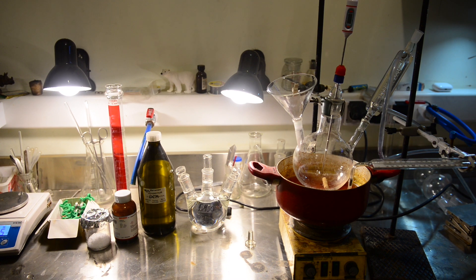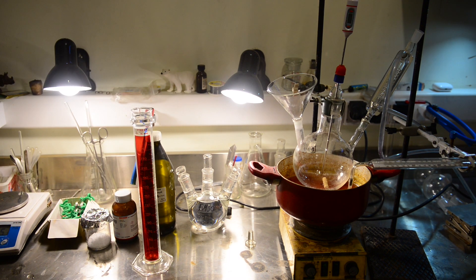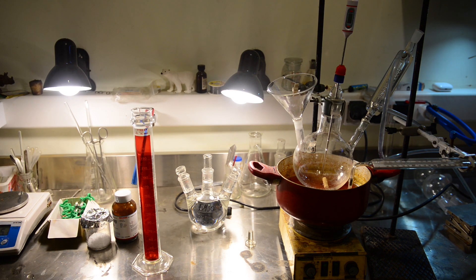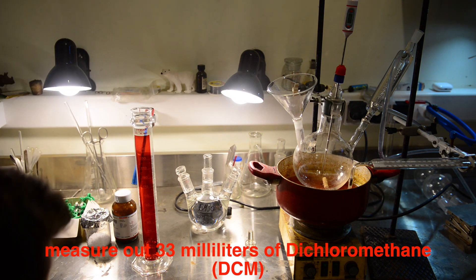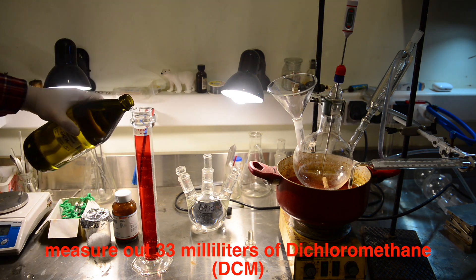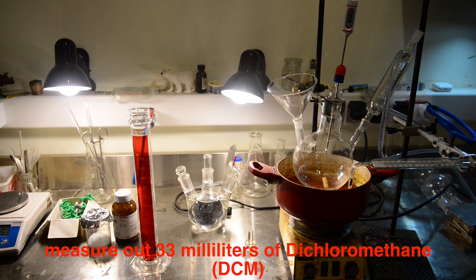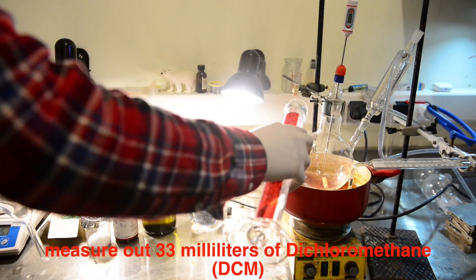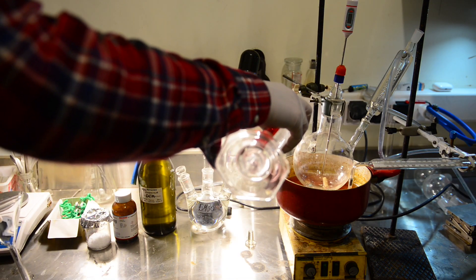Catechol and sodium hydroxide are added portion by portion to a stirred methylene chloride solution in DMSO. In this video we tried a third scale of the reaction, which we believed to be a relatively small scale. What could have gone wrong? But it turned out to be too early to experiment with such quantities for the first time.